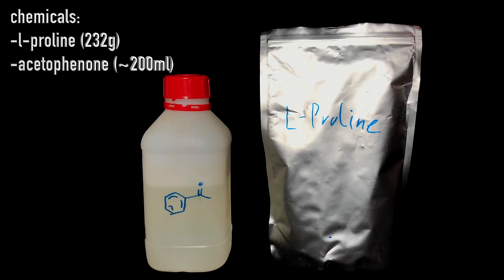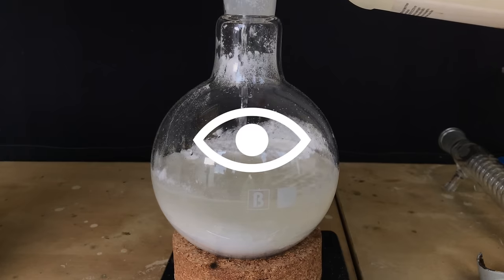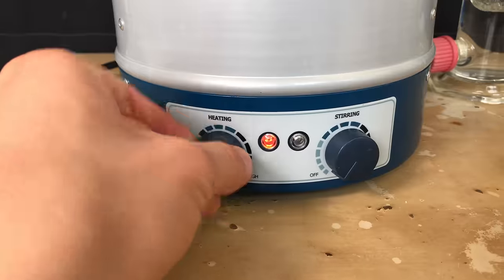Synthesizing the catalyst for making tear gas is really easy. All you need is proline, acetophenone and way too much free time. Exact amounts don't matter here, eyeballing the chemicals would probably be enough. This reaction will need to be heated. To keep the liquids from escaping, you therefore need a reflux condenser.